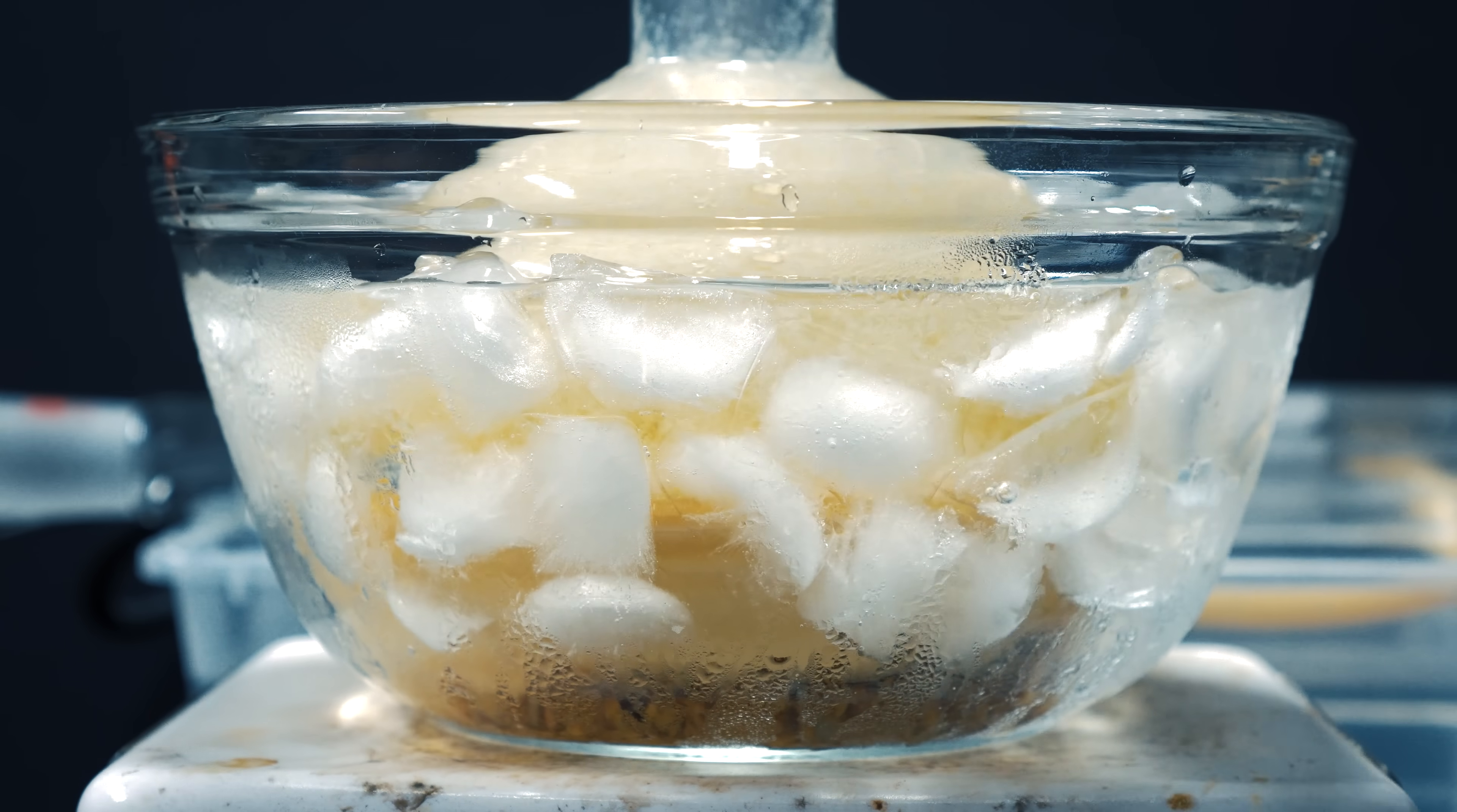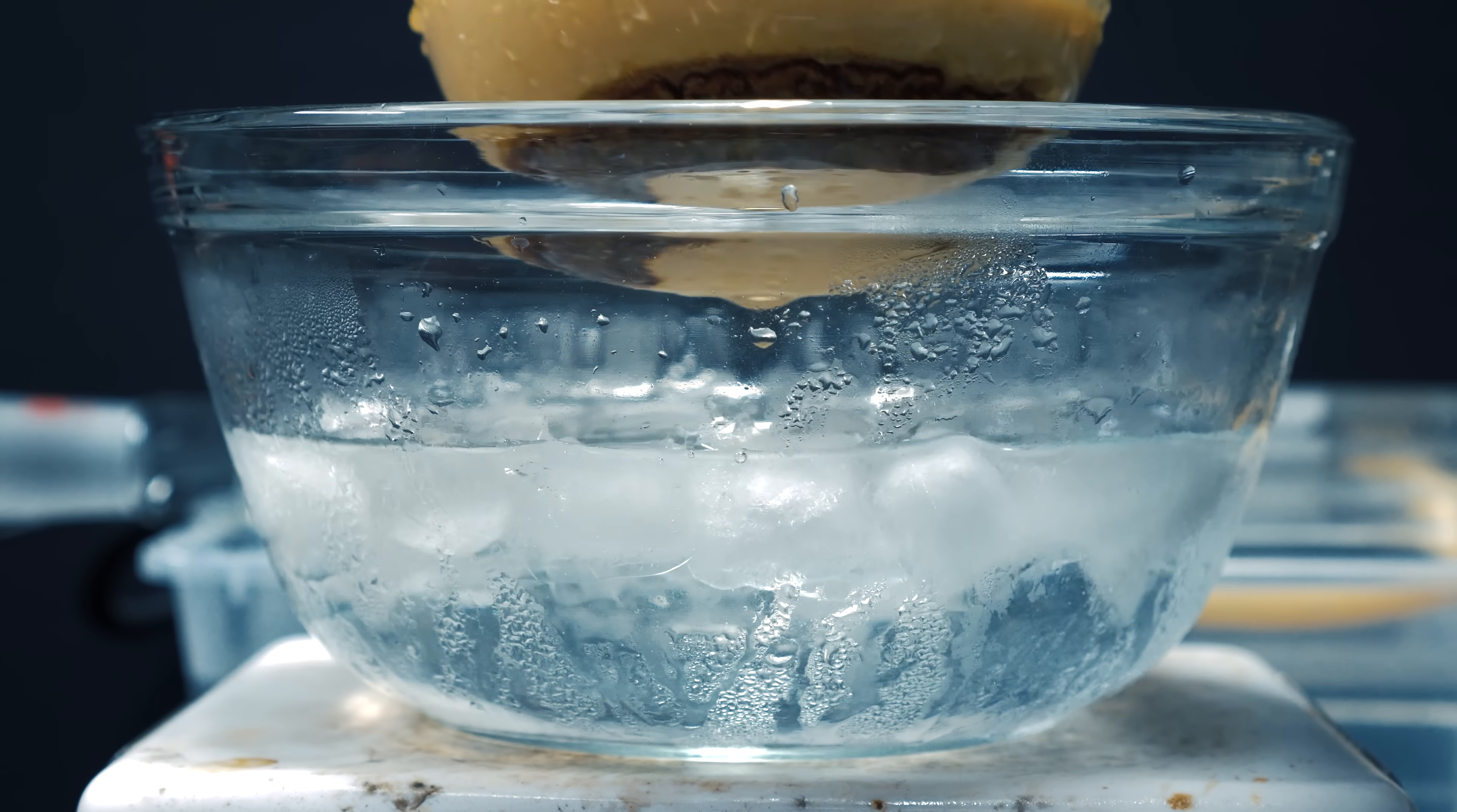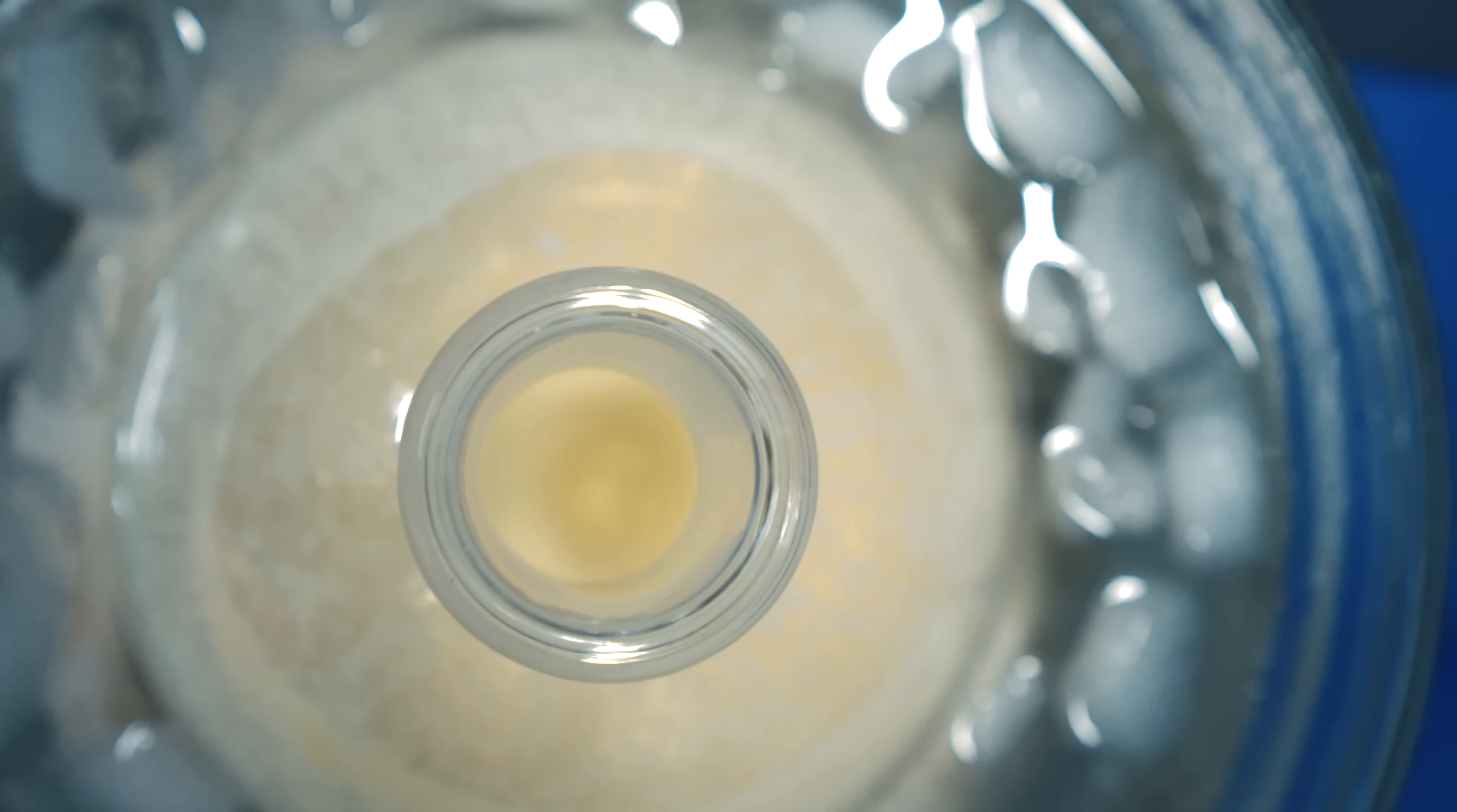At times, I had to put the solution into an ice bath, as the sodium hydroxide solution was heating it up. If it started bubbling or frothing due to the heat, I would lose some of my product. What's interesting was when I first started pouring, you can see this thick vapor come out of it.